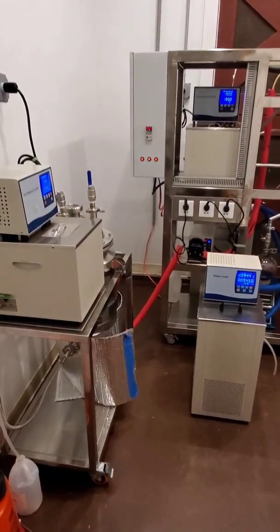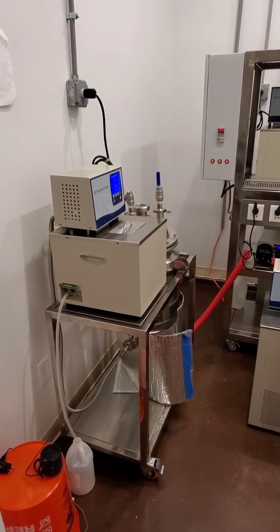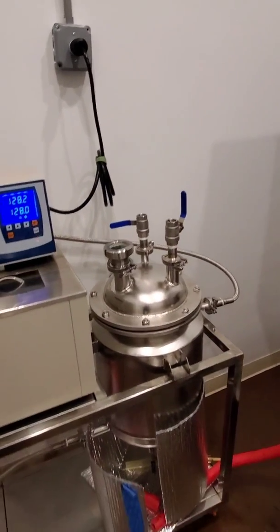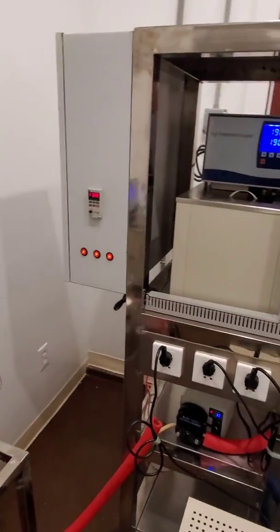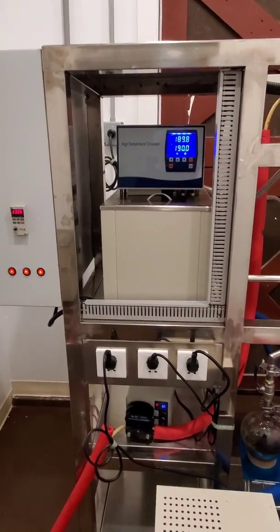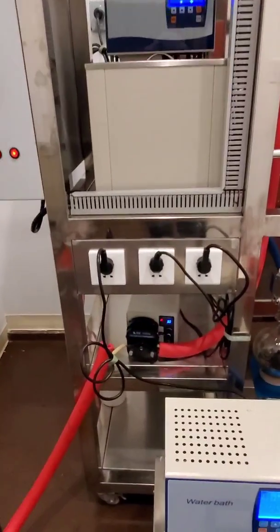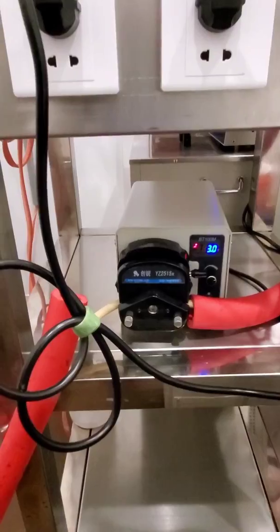Now that we're all set up, we are ready to start processing. I'll walk you through the machines and then we'll talk about the difference between crude and distillate. The first machine we have here is a pre-heater vessel. This is used to heat up the crude oil before it goes to our evaporator. The next machine is our evaporator heater, which is used to make sure that the crude oil is turning into vapor, allowing the distillate to separate from the crude oil. Right here we have a peristaltic pump, which pumps oil from the pre-heater to the evaporator.